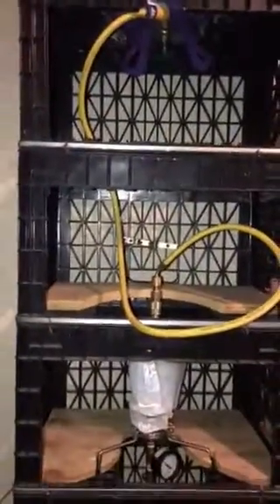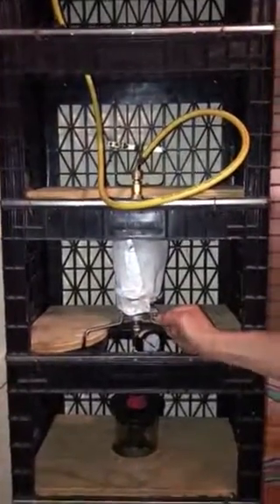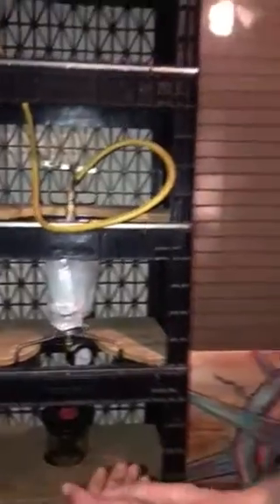I have used the vacuum pump and pulled a vacuum down into this column — it is completely vacuumed down. As soon as I turn the valve on, frozen butane slams down into the column. You can watch the gauge as the solvent removes all of the CBDs, CBNs, and THC from the cannabis to make a medical product.